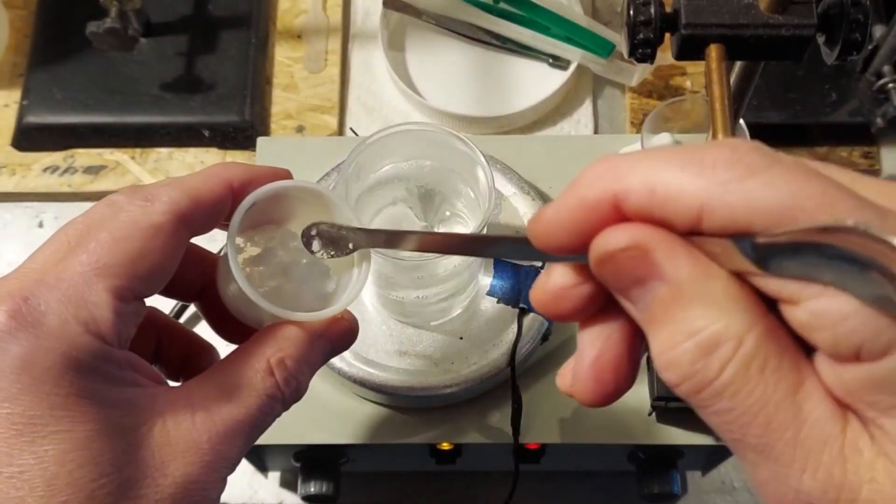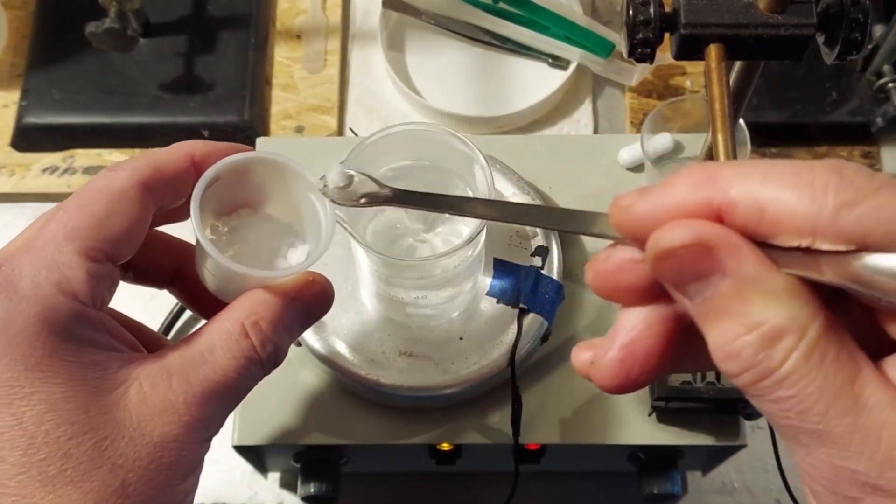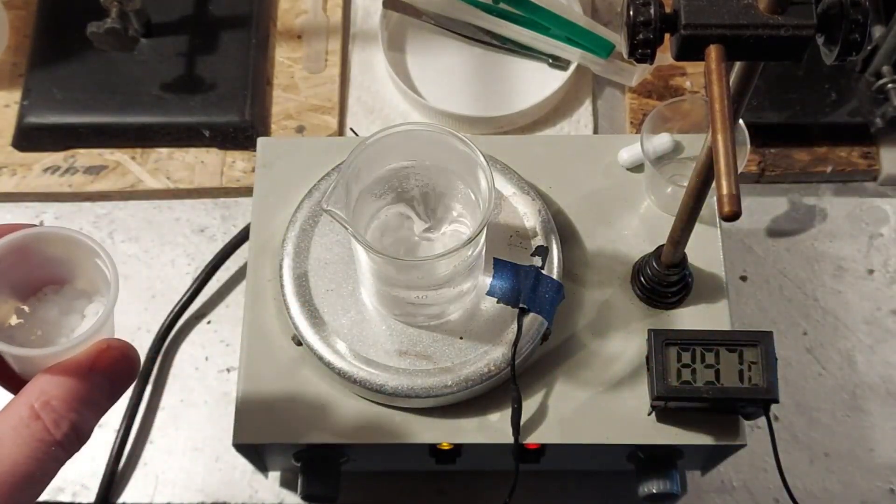So I've started adding the potassium bisulfate. The 12 grams here, it does not dissolve readily, so this is going to take some time. I'm not going to keep you waiting. We'll come back when it's completely dissolved.